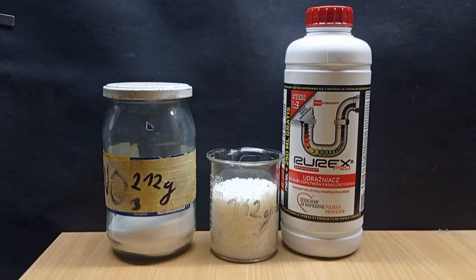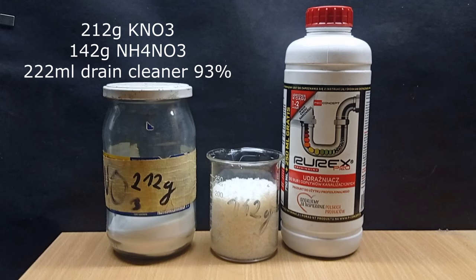I used stoichiometric proportions. I've prepared 212 grams of potassium nitrate, which I bought as salt to cure meat, 142 grams of ammonium nitrate that was recrystallized from common fertilizer, and 222 milliliters of 93% sulfuric acid drain cleaner that I just bought online.